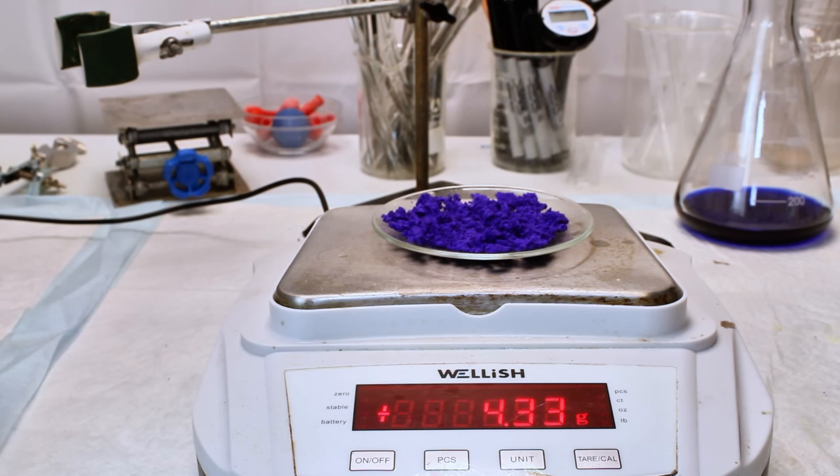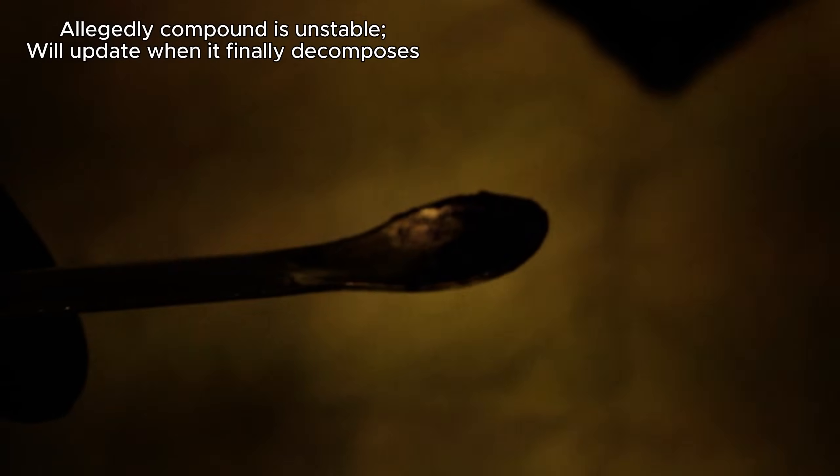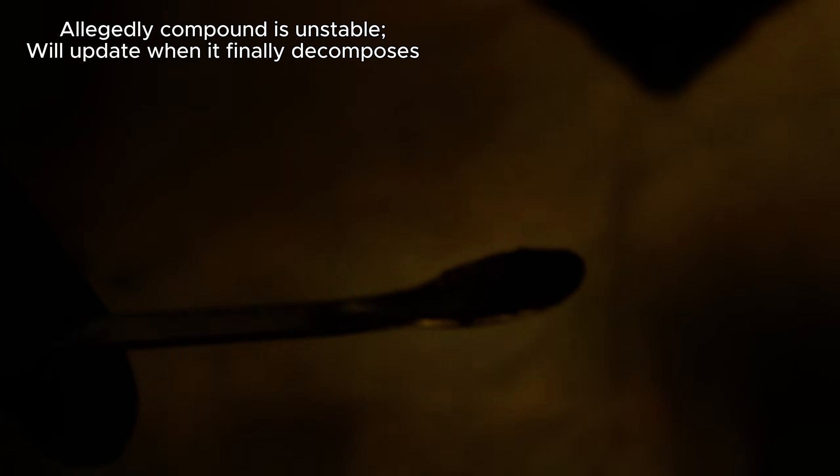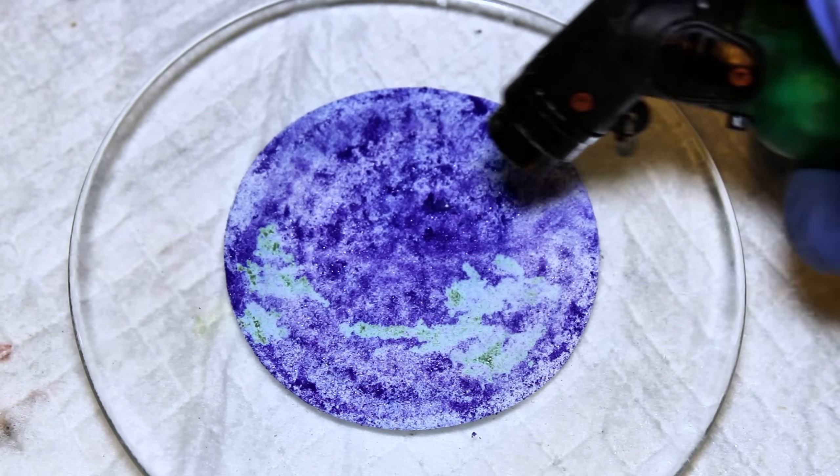However, I made this compound nearly two months ago, and since then it's been sitting in a clear glass vial looking as gorgeous as the day I made it. That said, I'm assuming maybe it simply breaks down if it isn't properly dried, or maybe I just need to give it more time, and I'm not actually sure.